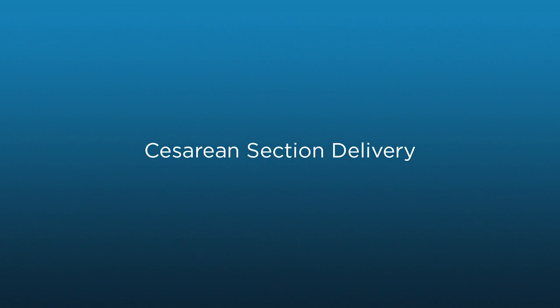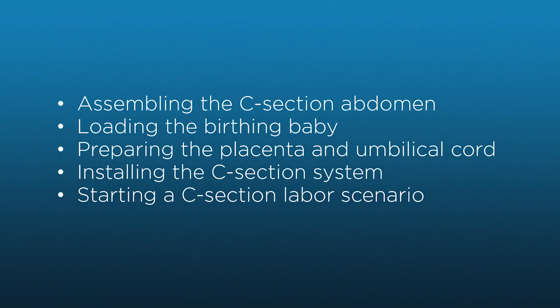In this video, you will learn how to set up and run a c-section delivery with a c-section abdomen cover. By the end of the video, you should be ready to assemble the c-section system, load the birthing baby with the placenta and umbilical cord, install the complete c-section system, and start a c-section scenario.